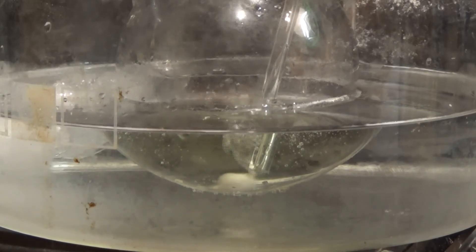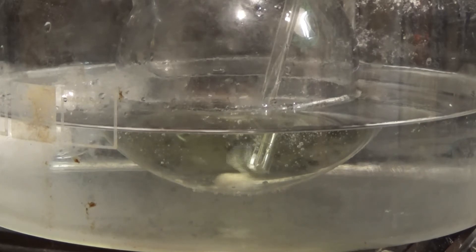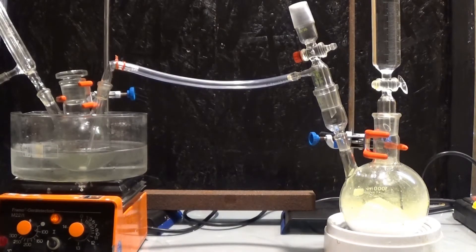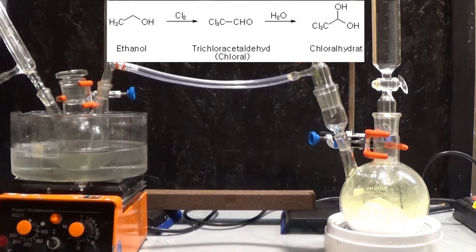Now after you saw the initial coloring and absorption of the chlorine in our ethanol, I am going to talk a little bit about what is happening in the reaction flask. A warning, the overall reaction is not that well known. Anyway, as we drop the HCl to the TCCA we are generating molecular chlorine Cl2 gas.